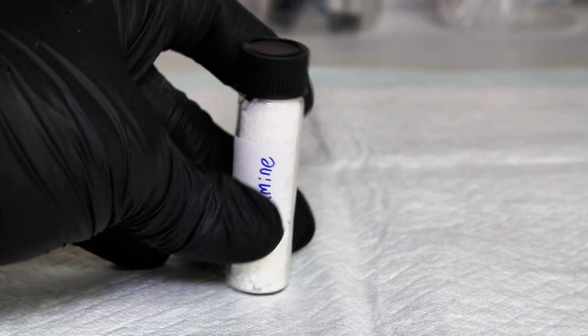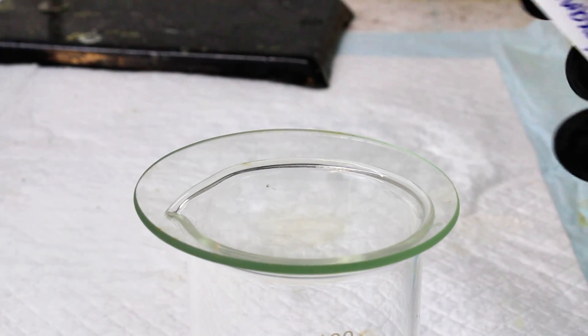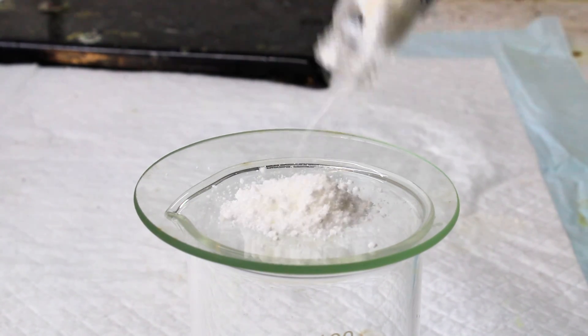Anyway, I go ahead and boil this stuff until hexamine crystals start to crash out, and then I load it into an oven and dry it out the rest of the way. This is my final product, and you can actually see that I burned it a little bit on accident.